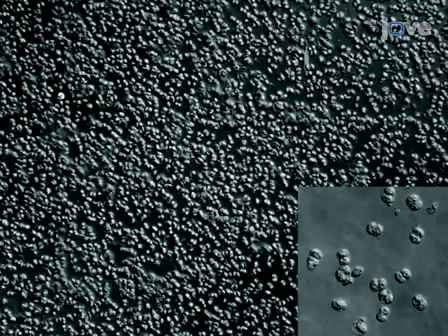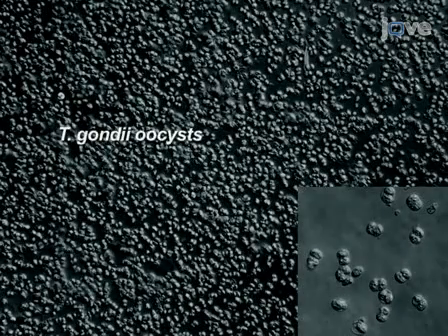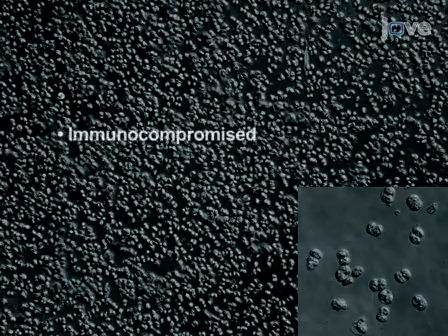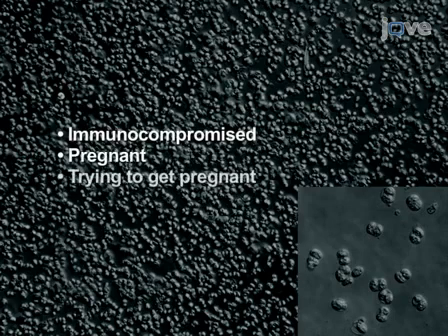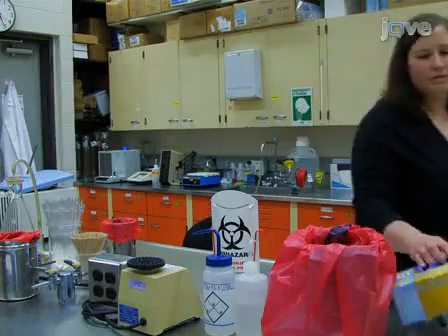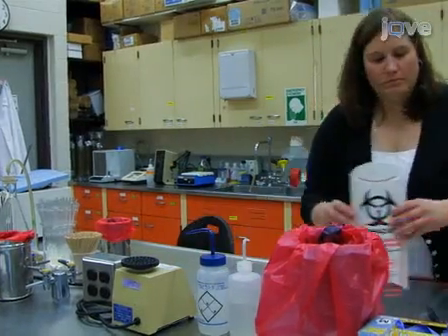Before beginning any work with T. gondii oocysts, important safety considerations should be taken into account. People who are immunocompromised, pregnant, or actively trying to get pregnant should not handle the pathogen due to the risk of acquiring toxoplasmosis, which can cause illness and severe birth defects. To reduce the risk of infection, set aside a designated space for this procedure and post signs to warn others before they enter the room.